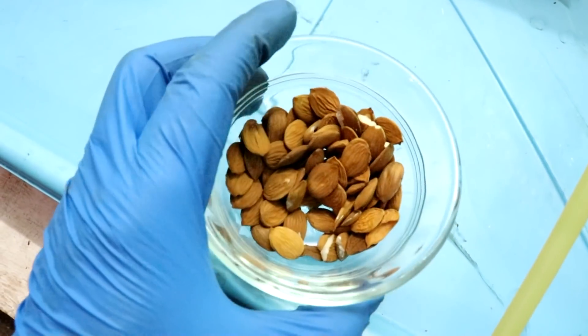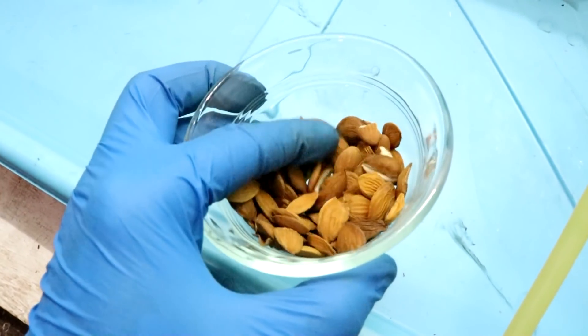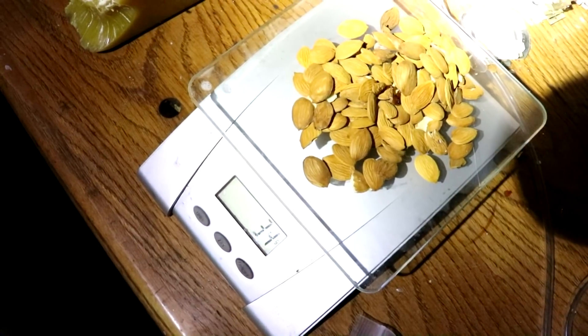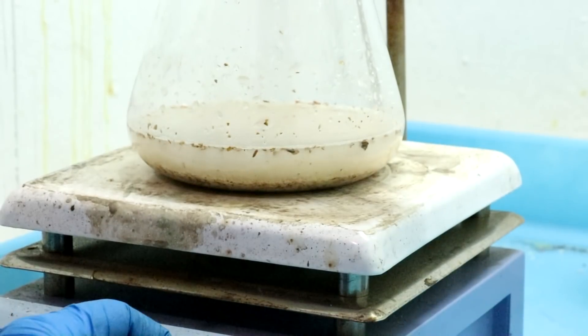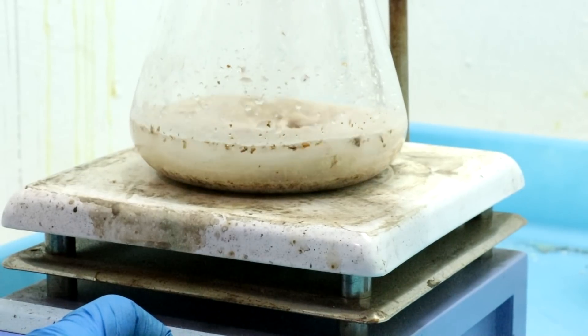Here's all of the almonds extracted from the peach pits. 34 grams. Okay, I've got the chopped up almond pieces inside of the flask.